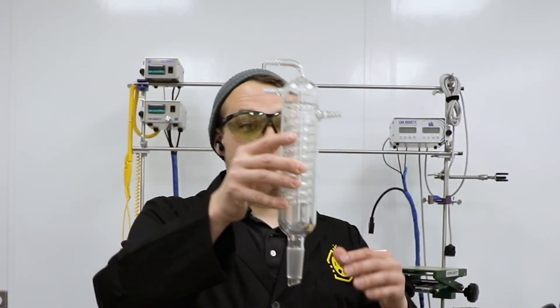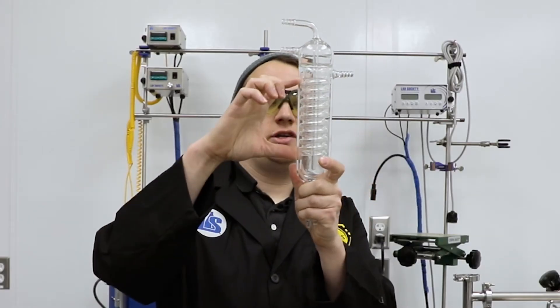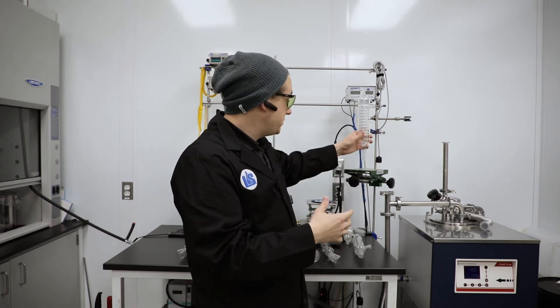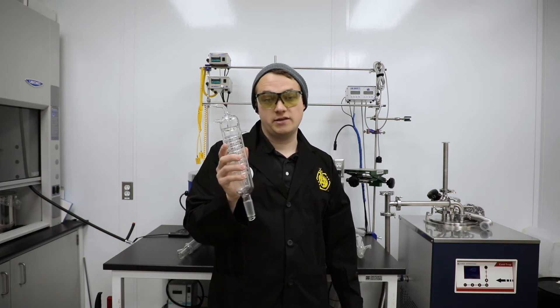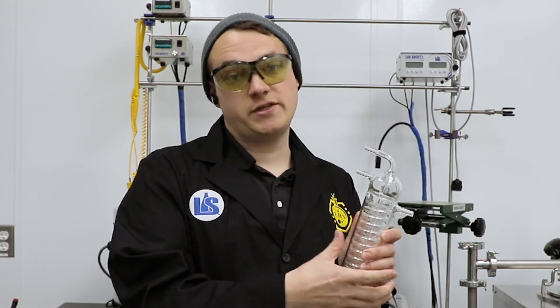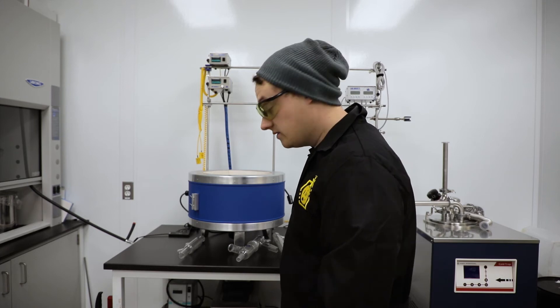This is a Friedrichs condenser. It's similar to a cold finger condenser, however it's got a molded glass section inside that increases the surface area similar to that of a coil condenser. These are great for almost pre-traps, terpene distillation, and auxiliary condensers. We actually sell a really cool auxiliary condenser kit that has been around for a few years. These are great for that because you can pull lighter compounds off using this with much more surface area, then switch over to your more viscous condensing apparatuses for your cannabinoid distillates.